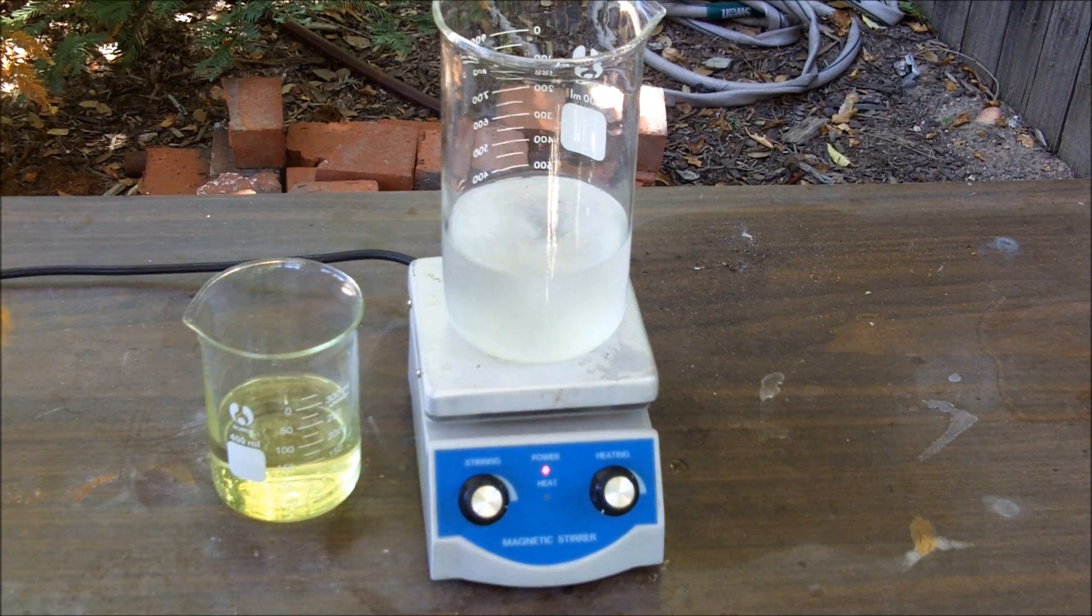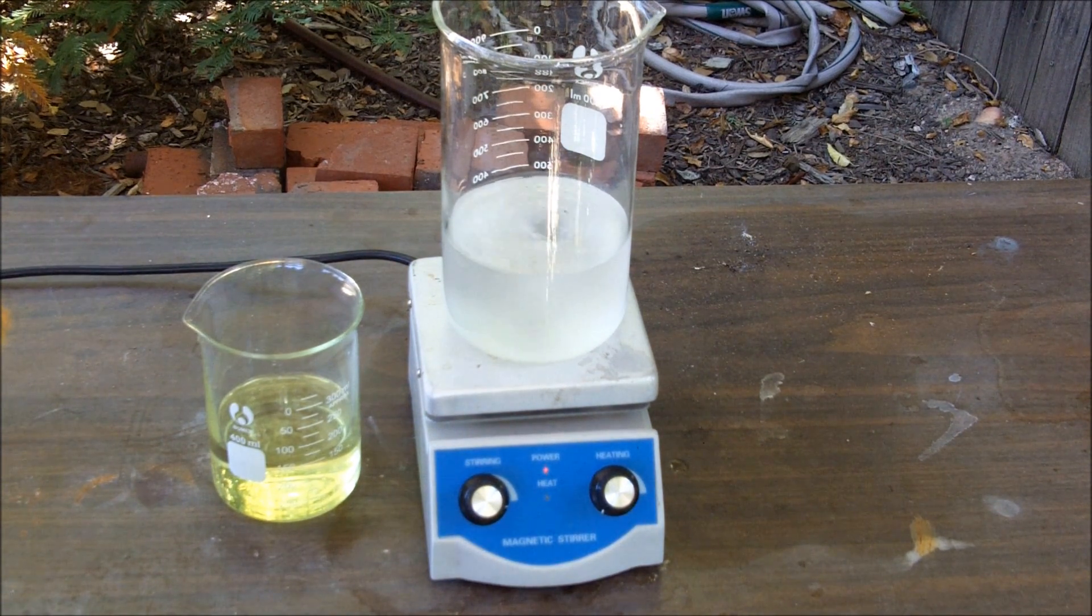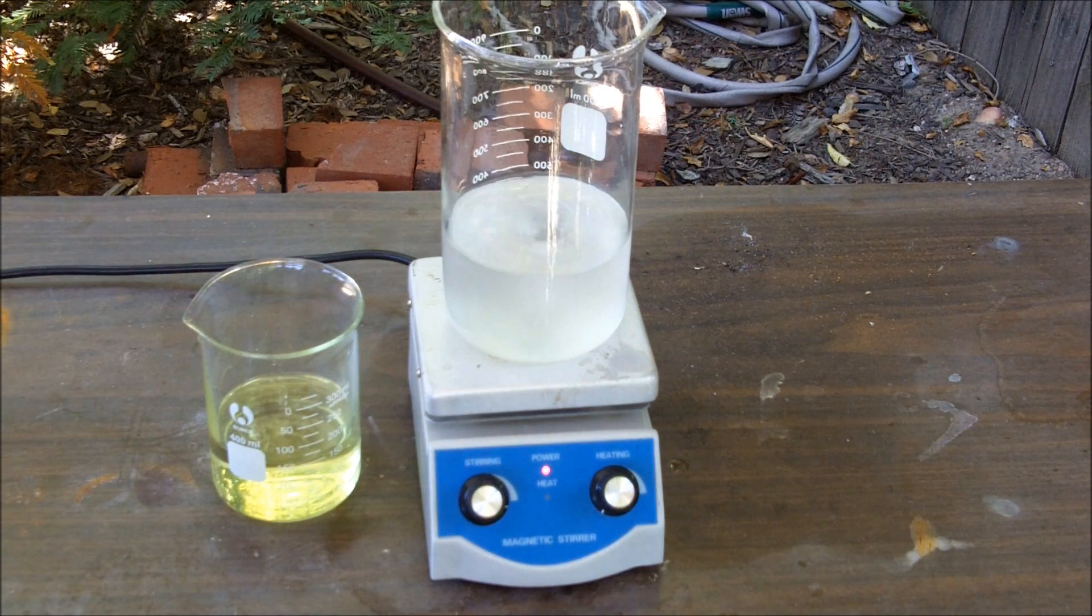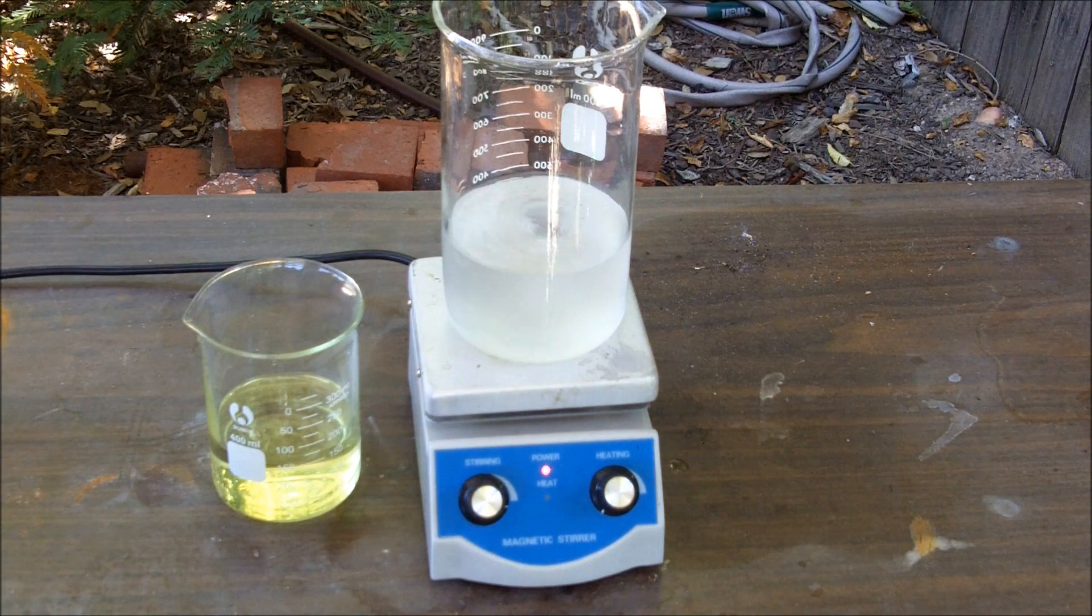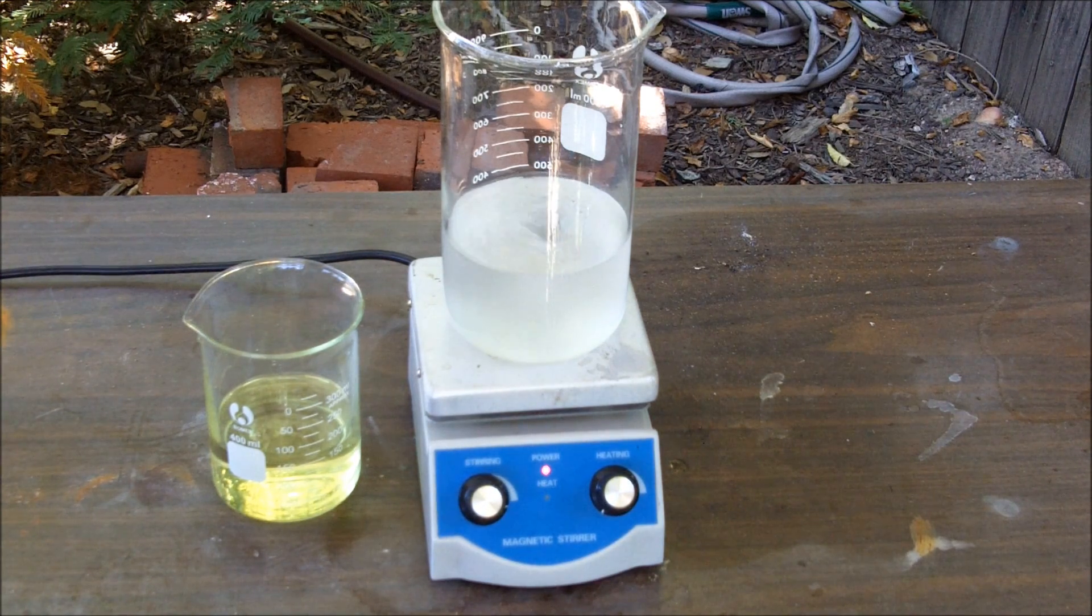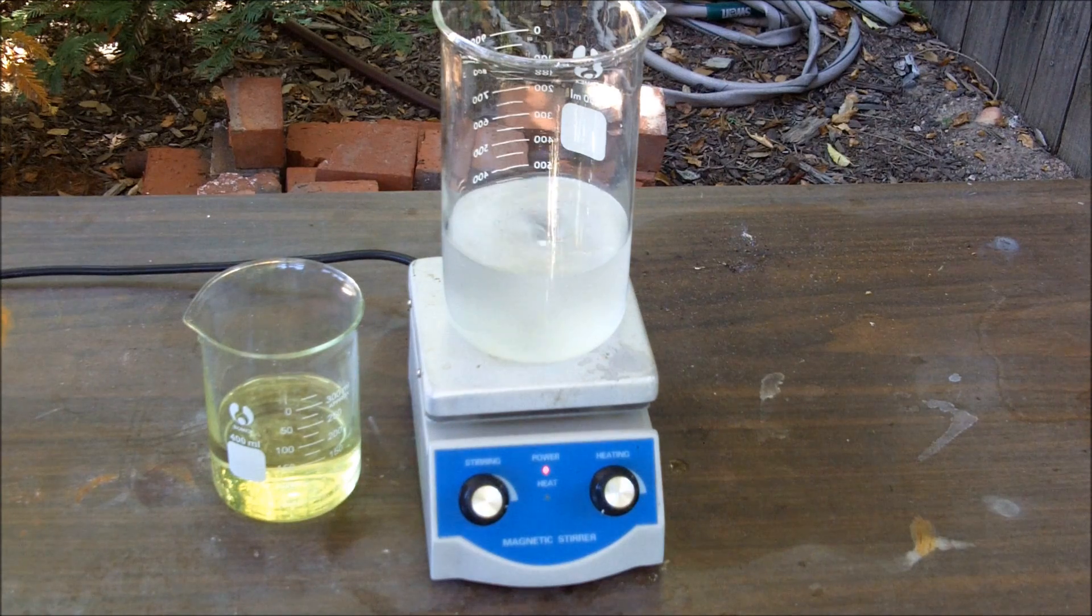Hey everyone! In this video I am making hydrazine sulfate, and I mean it this time, as opposed to my last video on hydrazine where I tried an adaptation of the Hoffman degradation that did not work. This time I am using the hypochlorite ketazine process.